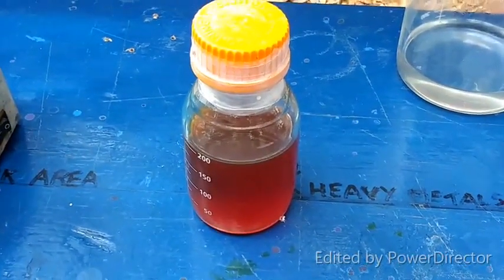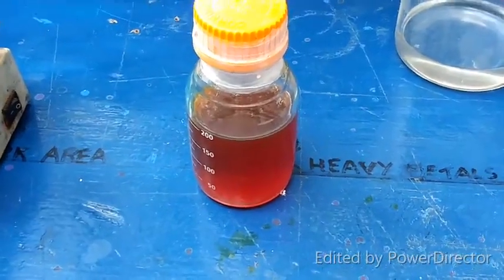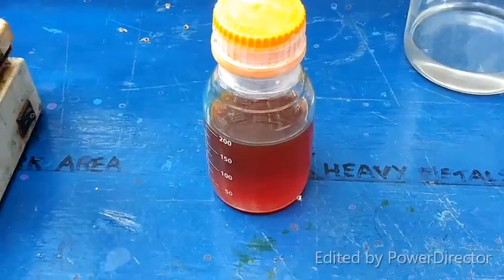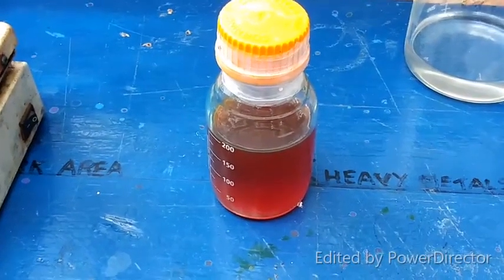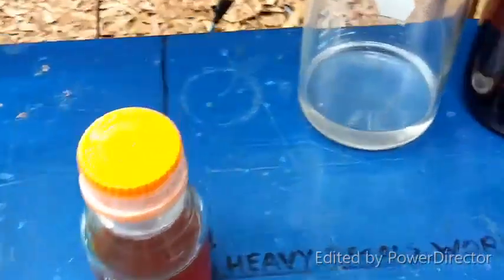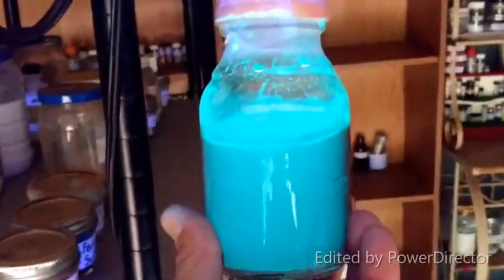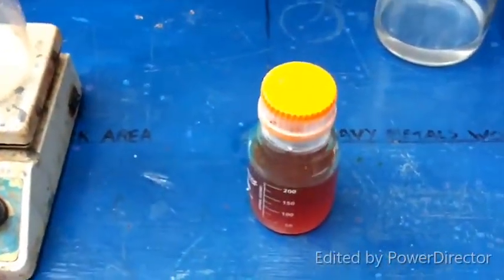Here is our cleaned-up acid extract that I've had storing overnight in a cooler full of ice. The next step is to neutralize this solution — the paper uses sodium bicarbonate, but we're going to use sodium carbonate solution. I don't know why they use bicarbonate instead of carbonate, but I just don't have any bicarbonate at the moment. I did want to show you: I mentioned this stuff is highly fluorescent. With a UV light going inside the lab, look at that — that's why it's very easy to track harmala alkaloids during extraction, because under UV light they glow so brightly.